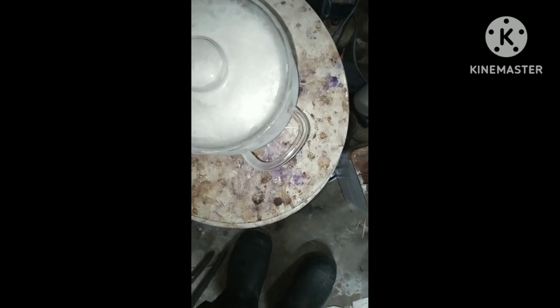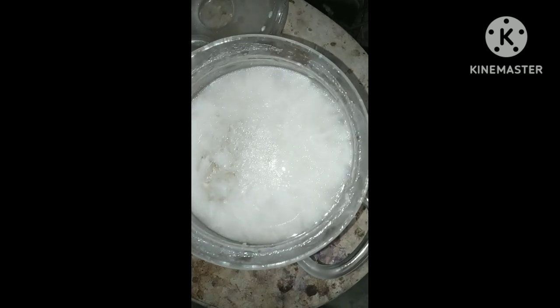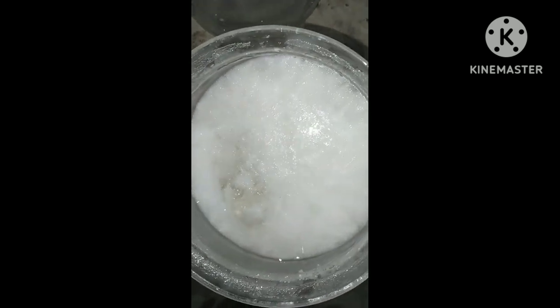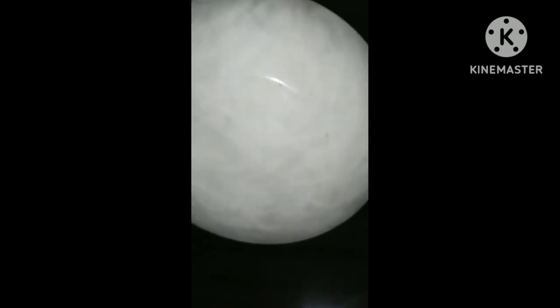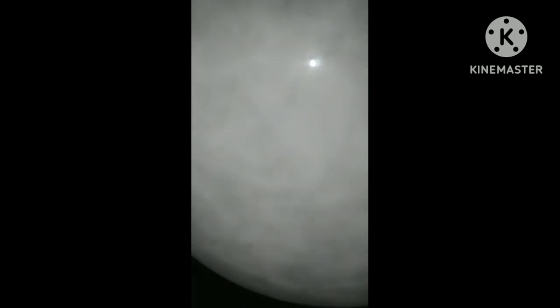So I made a mistake — I froze it and left it in there a little bit too long, but it brought me to a weird thing. I assumed it was going to all be frozen, but as you can see there's liquid in there that's not frozen and it's been over a day. But if you look at the bottom you can see all the nice crystals that had formed. Unfortunately I'm going to let this all melt and see what I'm getting back — it won't hurt nothing to do this, it just hurts my time.